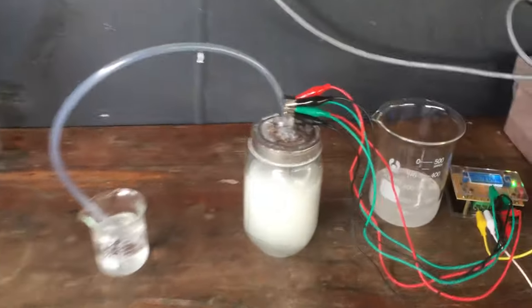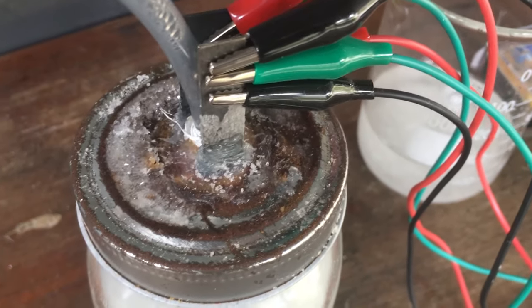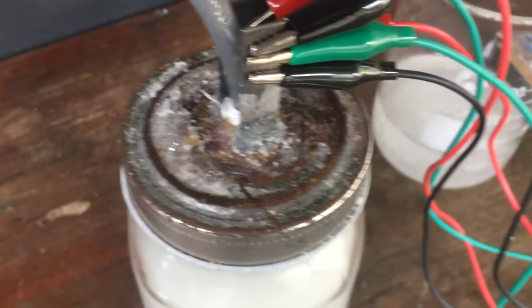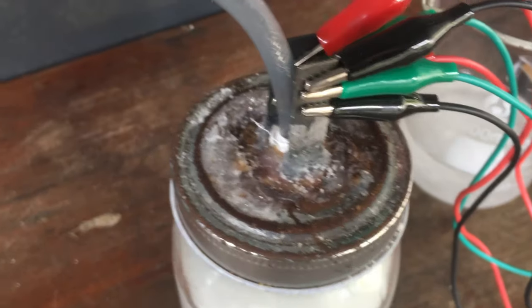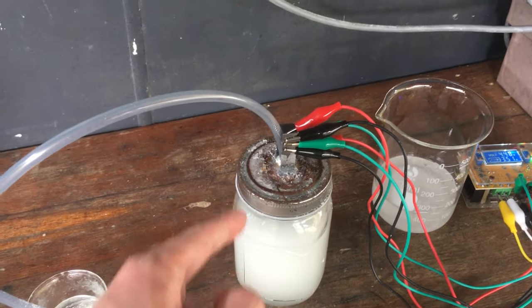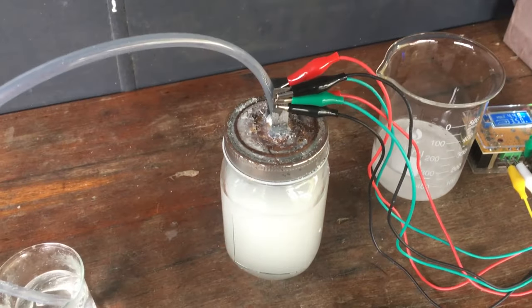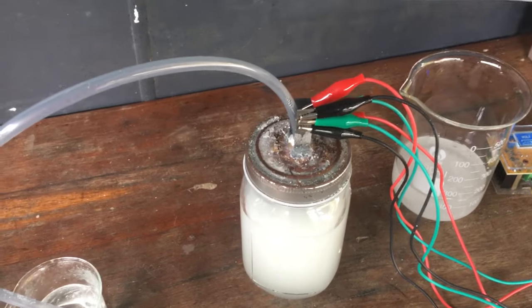Additionally, final thing to note is that the cell lid has started leaking just a little bit. You can see a whole bunch of crystallized chloride and chlorate on the lid of the cell there. It's not particularly significant at this stage, but I think it's about the end of the road for this cell. I think I'm going to have to take it apart after we finish this run.